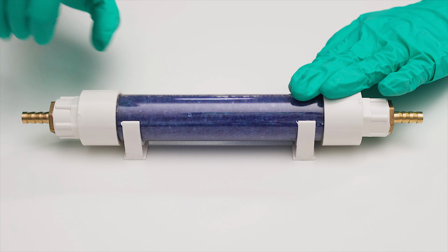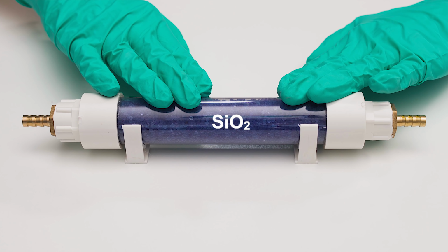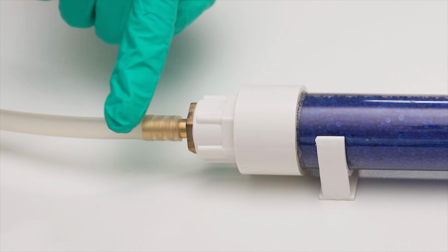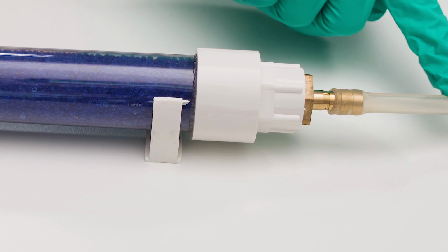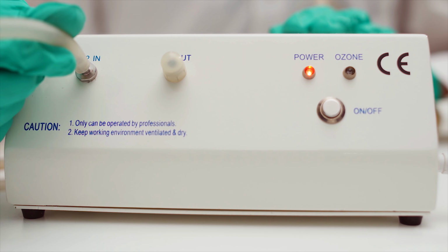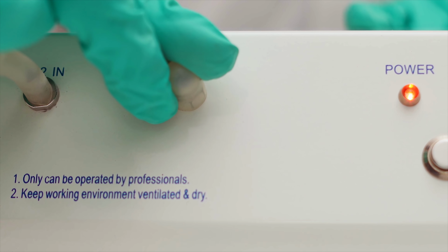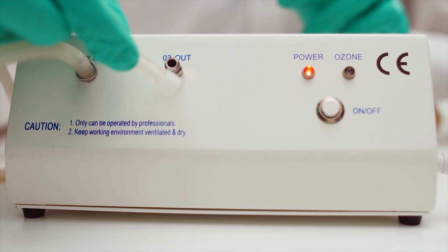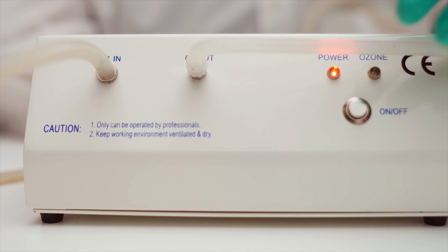Before oxygen is delivered into the device, it must be passed through a special tube with a desiccant. It is an airtight plastic container with a pipe for gas inlet, a desiccant, which is silica gel, and an outlet pipe. So this is where we supply oxygen from the balloon. Passing through the desiccant, it becomes extra dry and then is delivered into the ozone generator, where it passes through the corona discharge in the special quartz tube, which makes some of the oxygen transform into that very ozone I'll be using in this video.